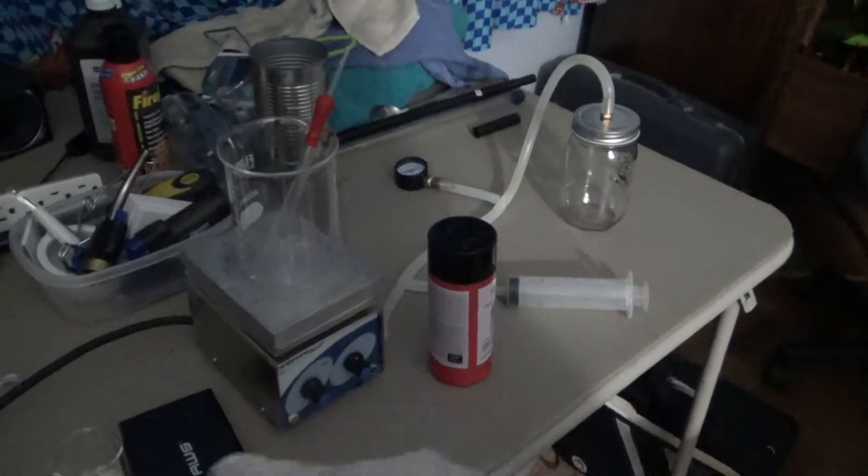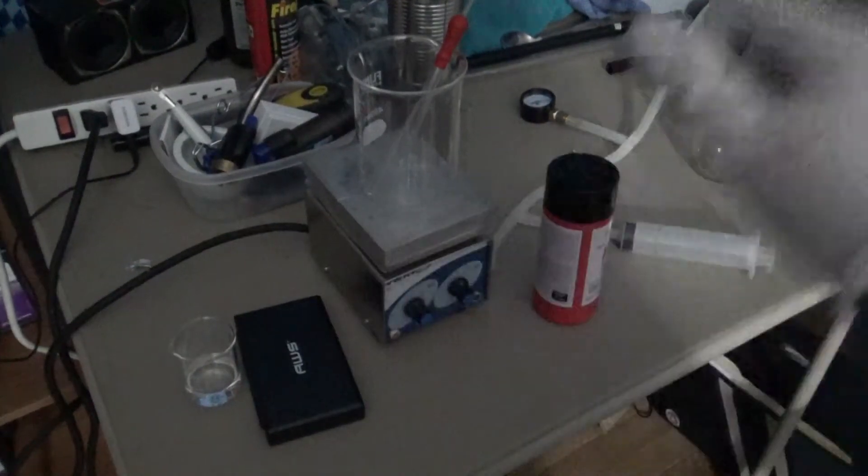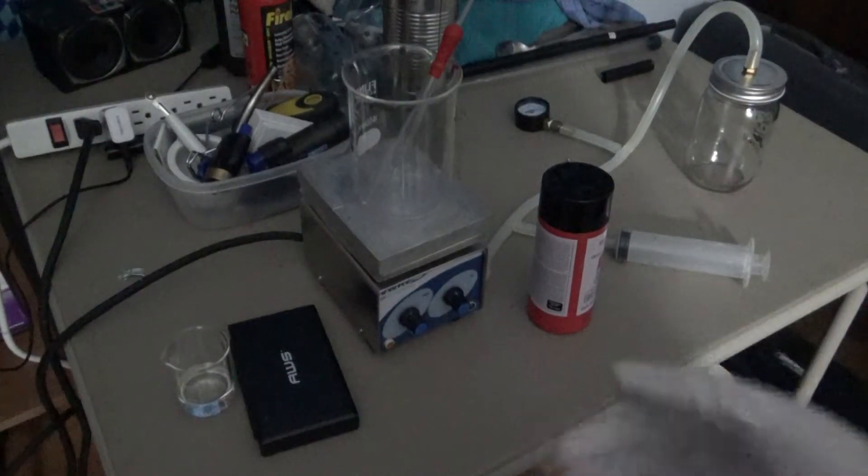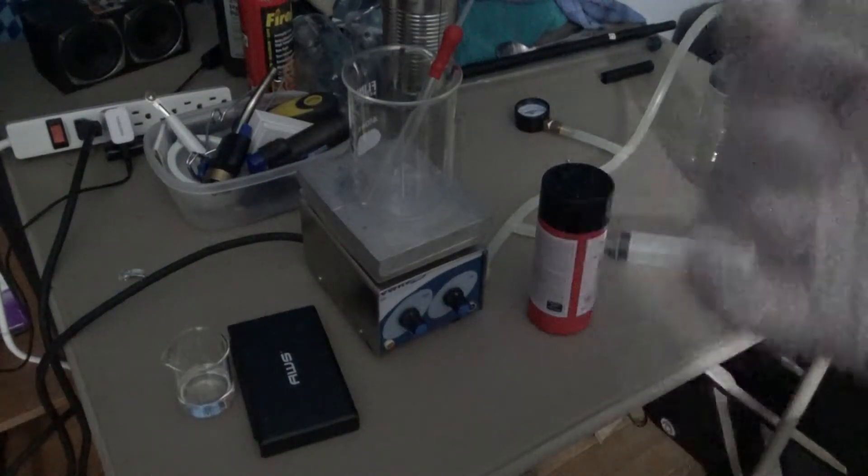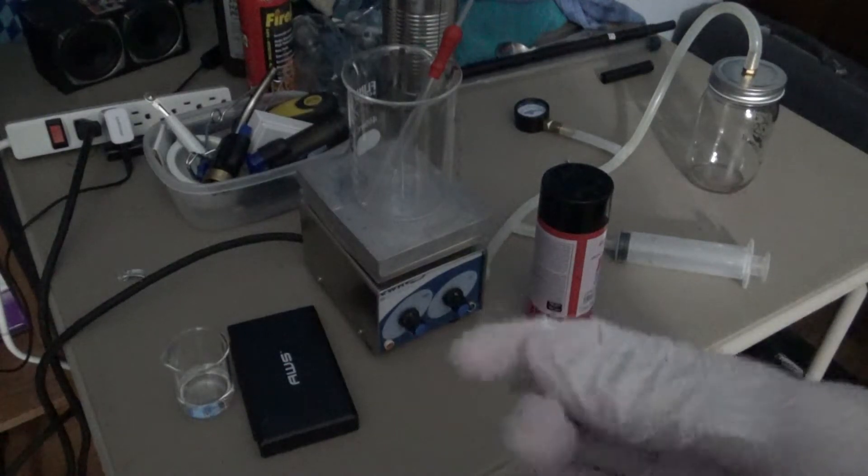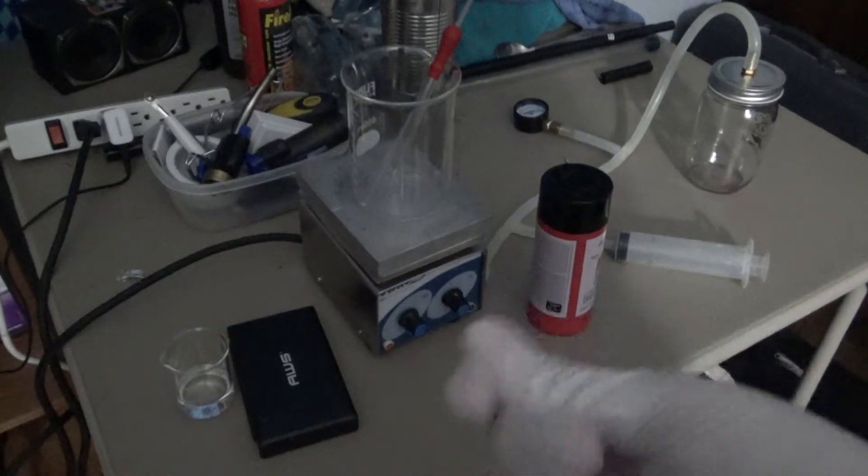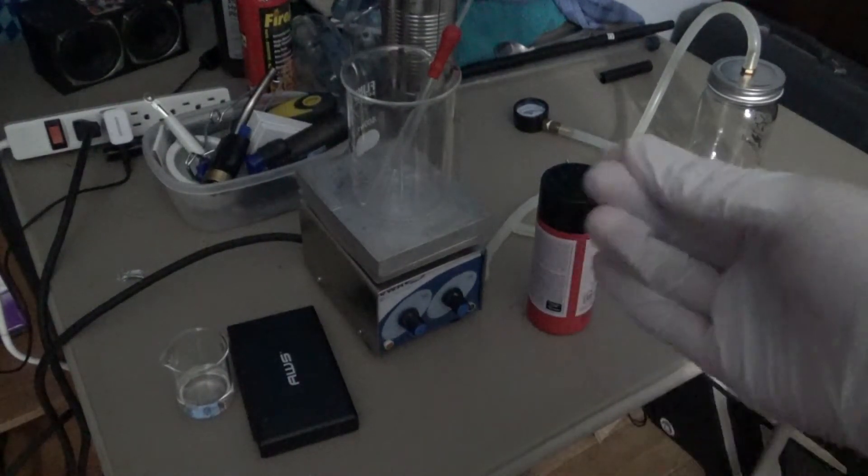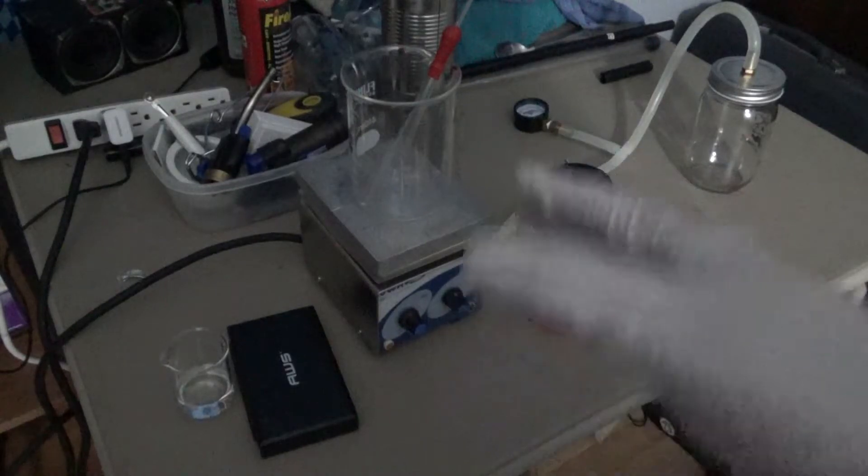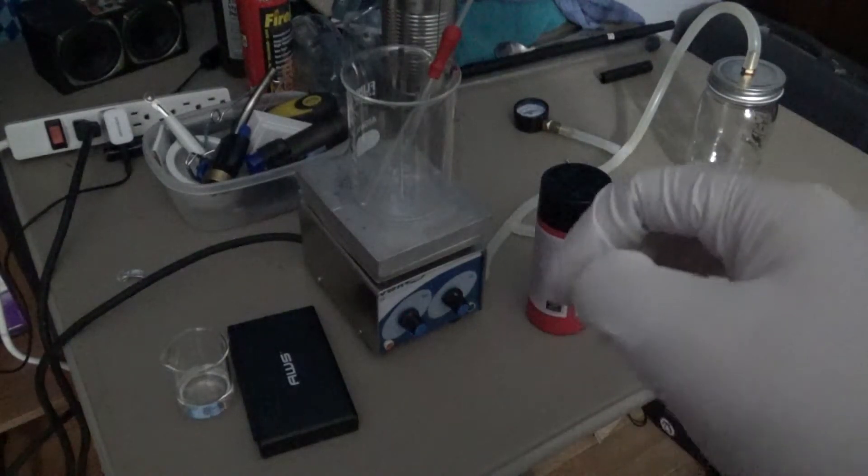What I'll do is I will put the hydrogen peroxide into the vacuum chamber, and I'll pull a vacuum. See, you can do this without a vacuum chamber, but the vacuum chamber speeds it up dramatically, at least from videos I've seen, and it also makes sense. I'm going to be putting a desiccant in there that will absorb the water. Popular options for desiccants are things like sulfuric acid or copper sulfate, because copper sulfate is very hygroscopic, which means it loves water, and will turn into the copper sulfate pentahydrate version.